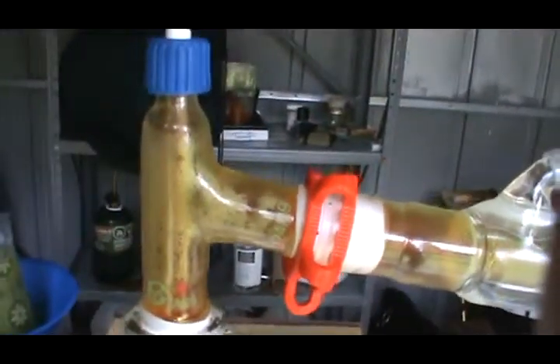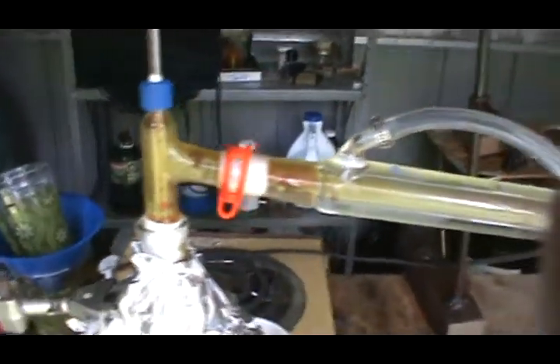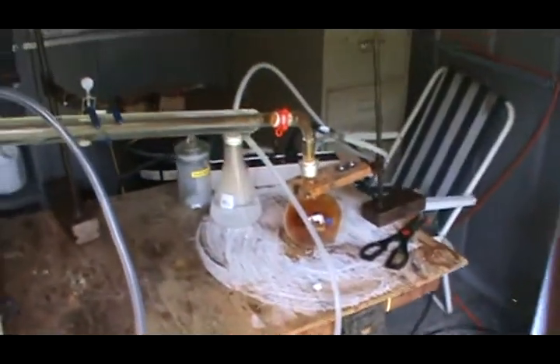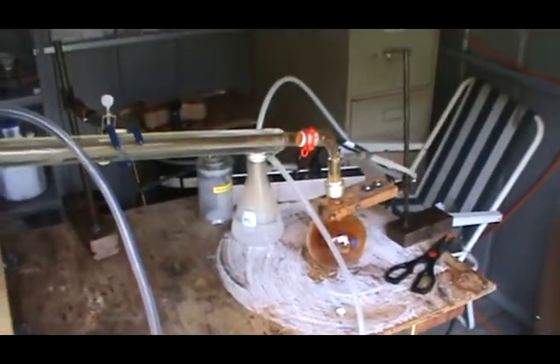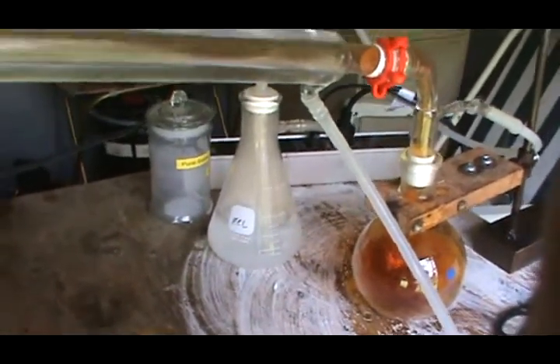Now you can start to see the condensation building on the still head. Temperatures are about 70-80 degrees so pretty soon we'll be getting our first drops of nitric acid. I've never used a bottle of lye before to neutralize the fumes but hopefully it works.